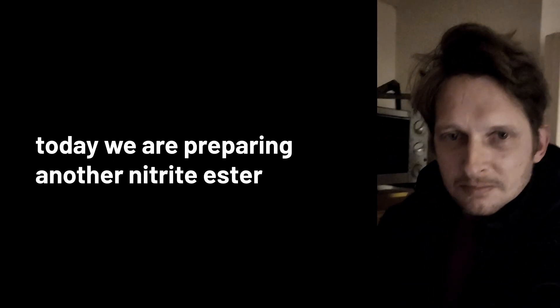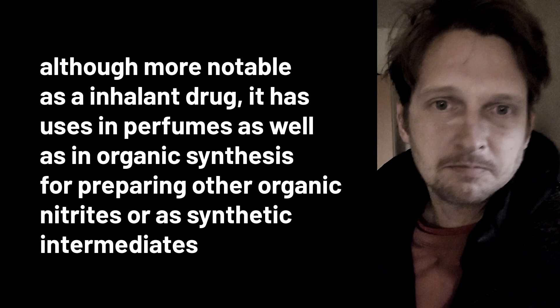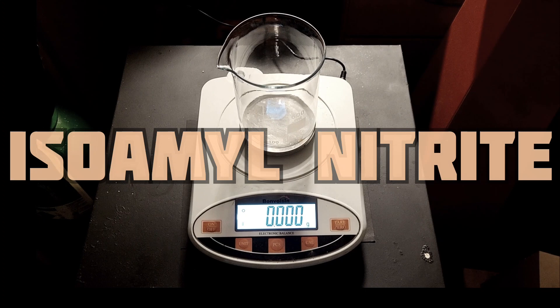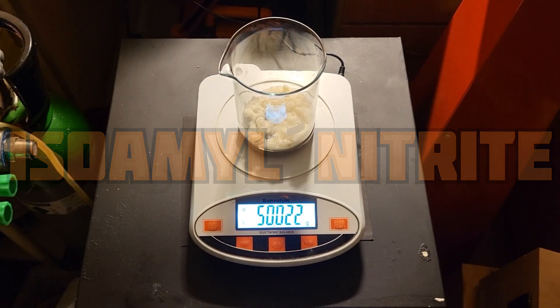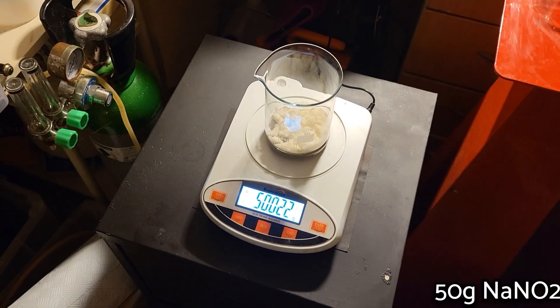Hola! Today we are essentially doing the same synthesis as isopropyl nitrite. Only this time we are doing it with isoamyl alcohol to make isoamyl nitrite, or amyl nitrite.